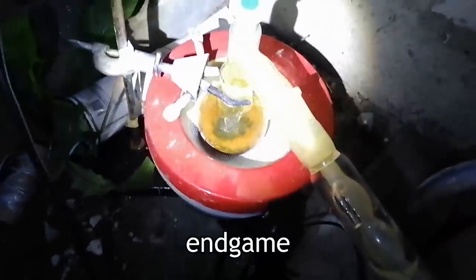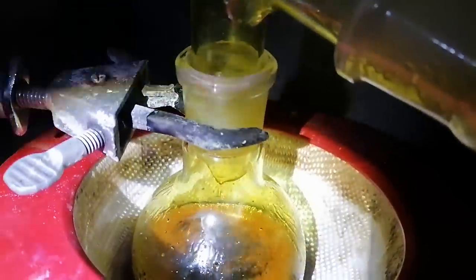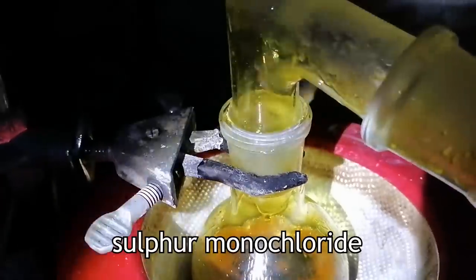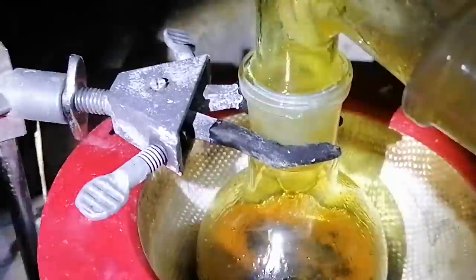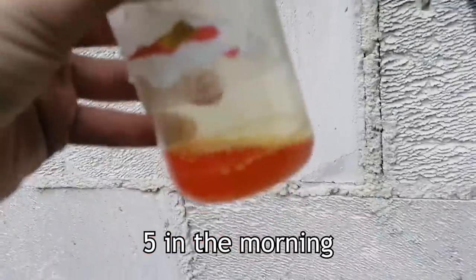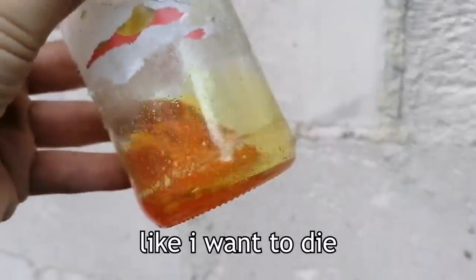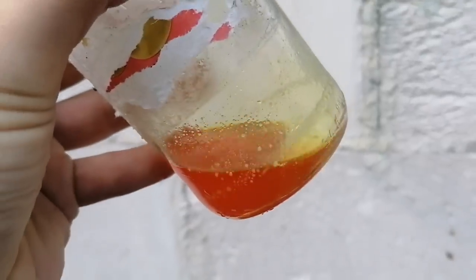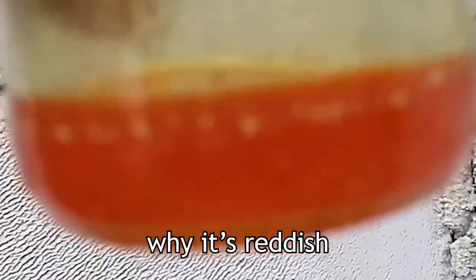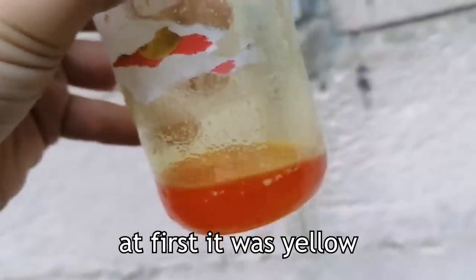Alright, we're in the endgame now. You can see it's pretty yellow, which is really good — that means sulfur monochloride, not dichloride. And that is what we want. It's 5 in the morning and I feel like I want to die. Anyway, this is 90 ml of sulfur chlorides, hopefully mostly sulfur monochloride, but I can see that it's really reddish and I have no idea why.